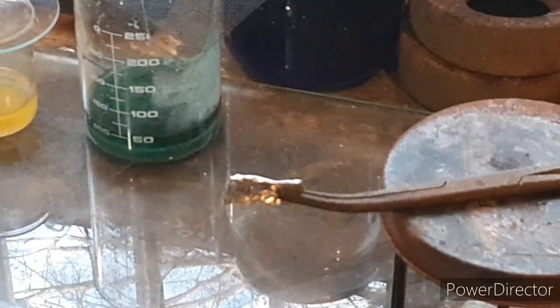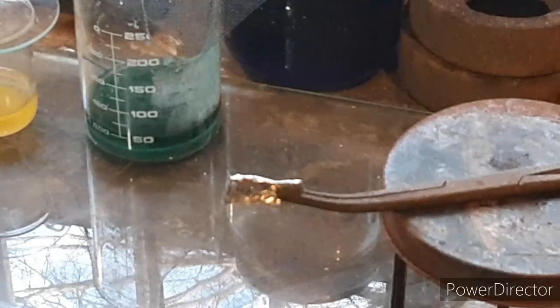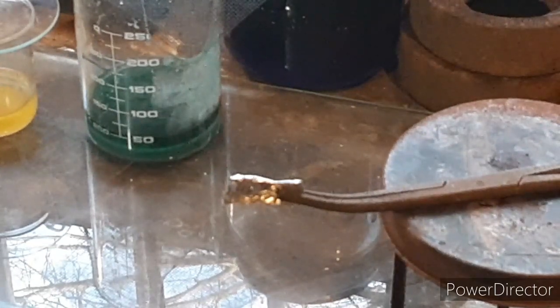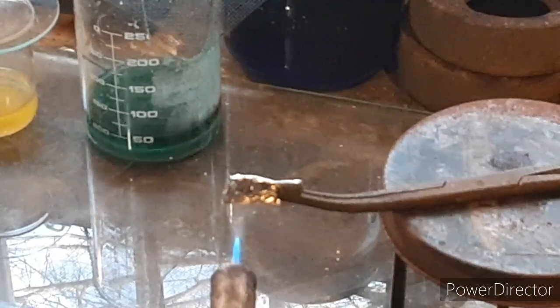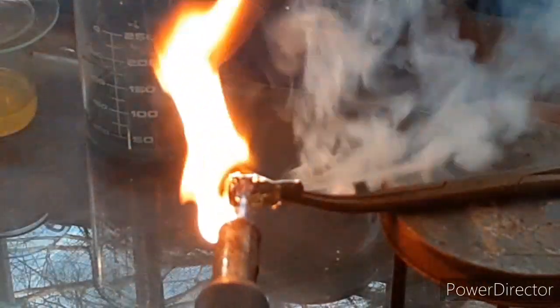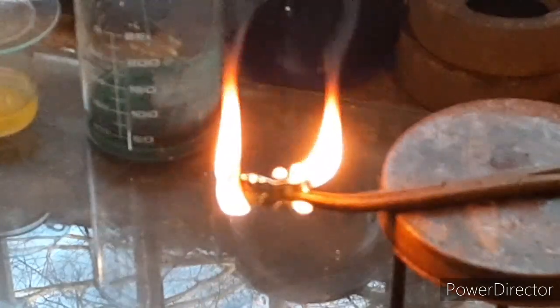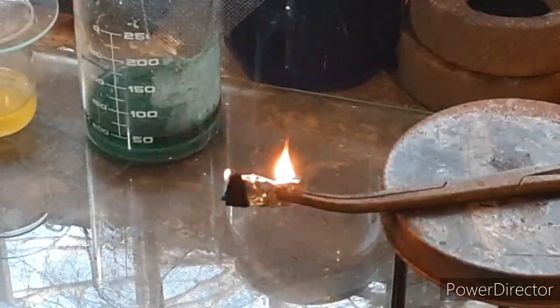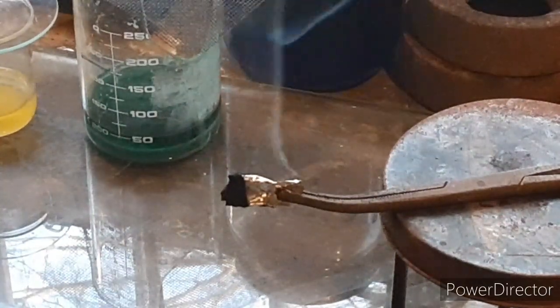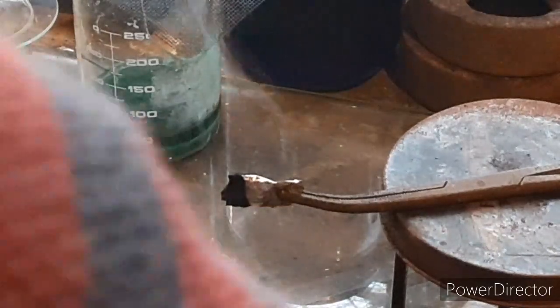So this is 100 milligrams of the dinitrophenol, confined. Let's see what this does when we apply heat to it. Yeah, not very impressive. Energetic, but hardly anything to write home about. So let's see how this goes when we swap this out for TNP.